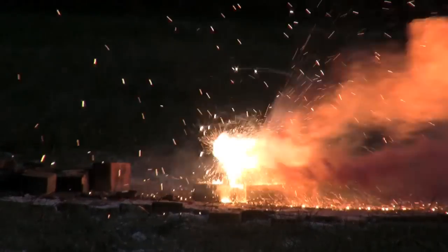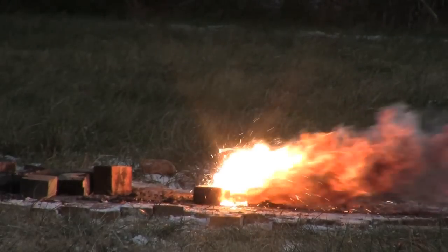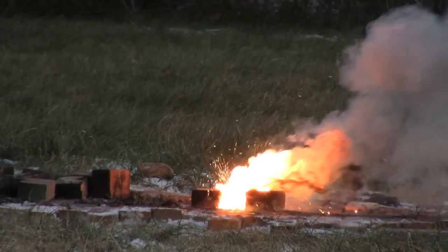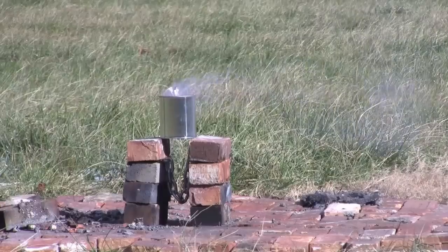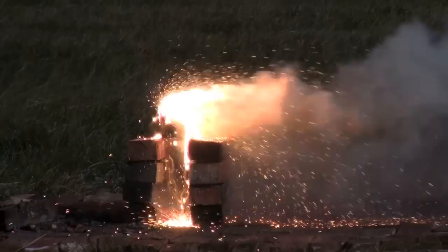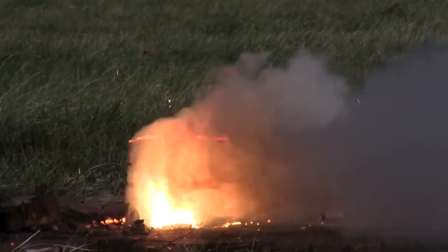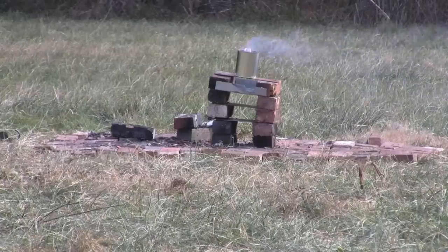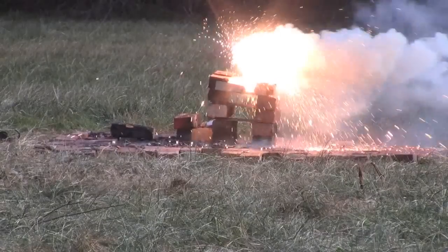That's so cool. Don't chase. We smell good. Water, water, water. There it goes — molten iron being spread everywhere, it's going through the first layer.